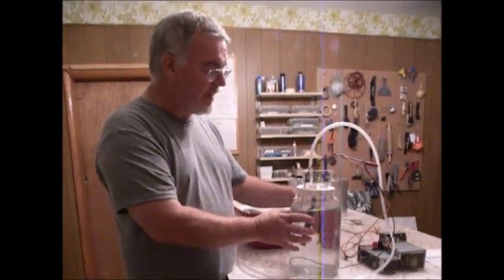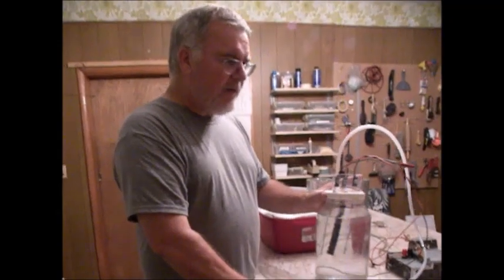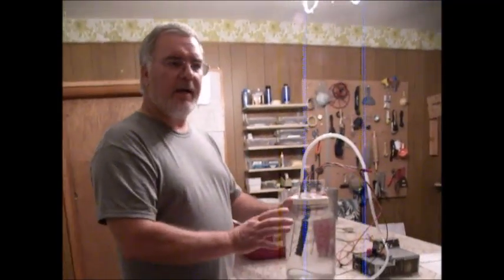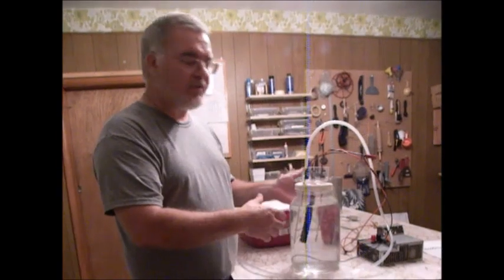Four days was the longest that I would run. You're probably starting to use up most of your potassium chloride in here and it's not going to run as efficiently. I ran it for 100 days, and the only time that I shut it off was just to switch out cells.